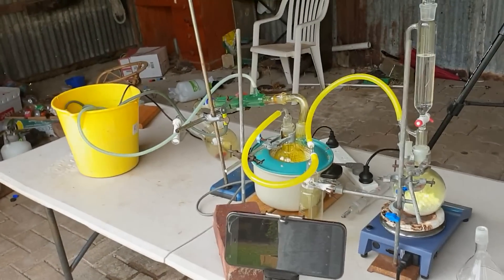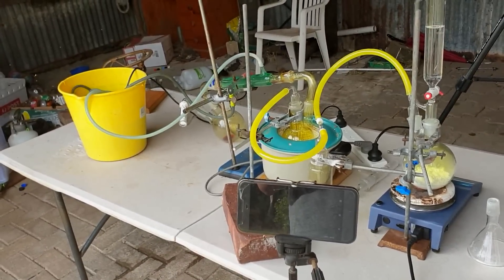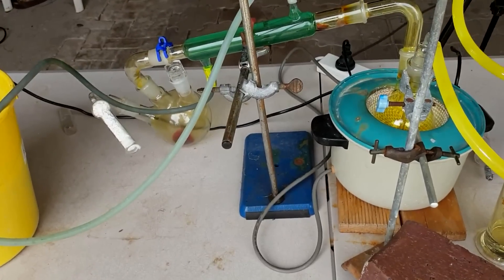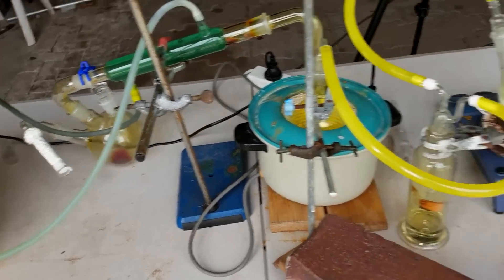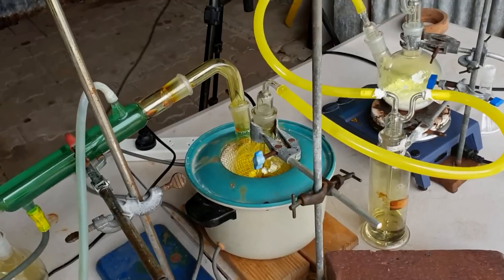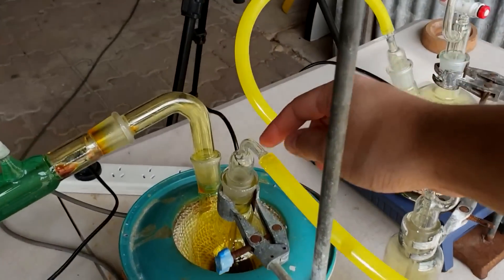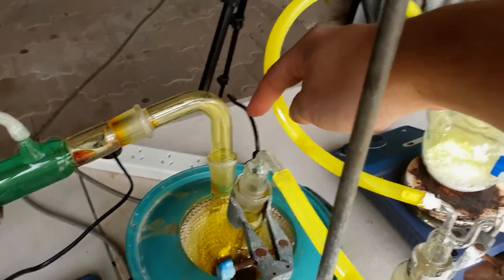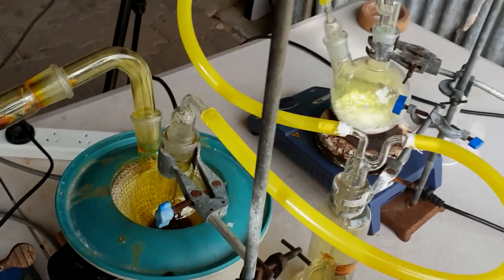It's actually a lot less maintenance than I thought it was going to be. It's just doing it by itself — been doing it for the last half an hour. Drip rate's pretty slow but it's pretty steady. Chlorine rate's pretty constant. It's doing exactly what I hoped — the sidearm's staying cool because of the constant flow of chlorine, whereas this has the refluxing sulfur chlorides in it. So even though they're the same height, they're actually at different temperatures.